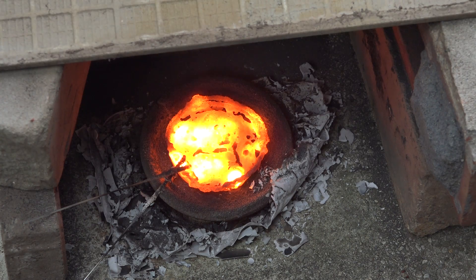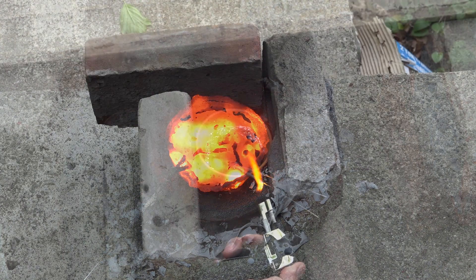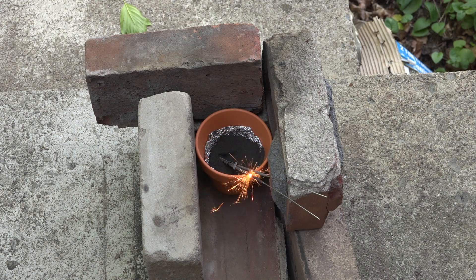Okay, looks like the reaction is done. That was pretty impressive. It melted the can, so I'm going to do it again, this time in a flower pot, and hopefully I can separate some chunks of manganese metal.